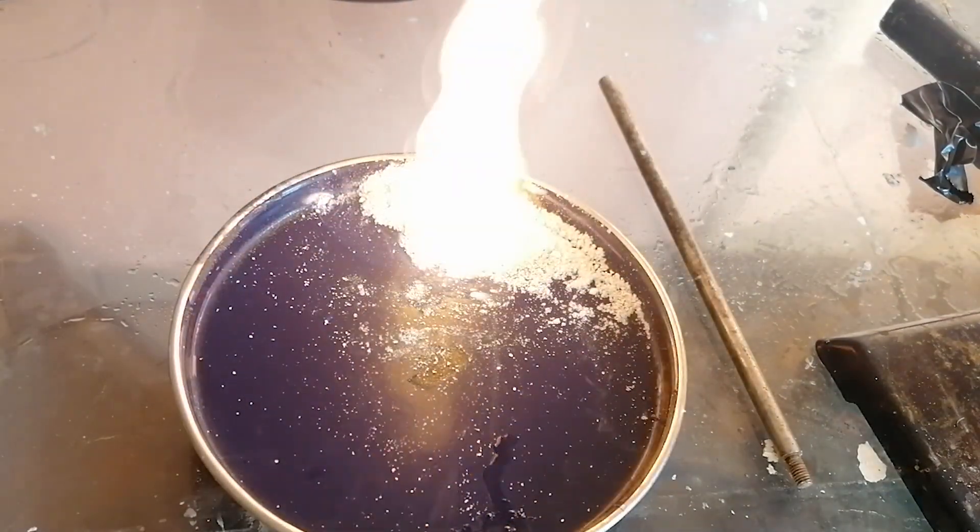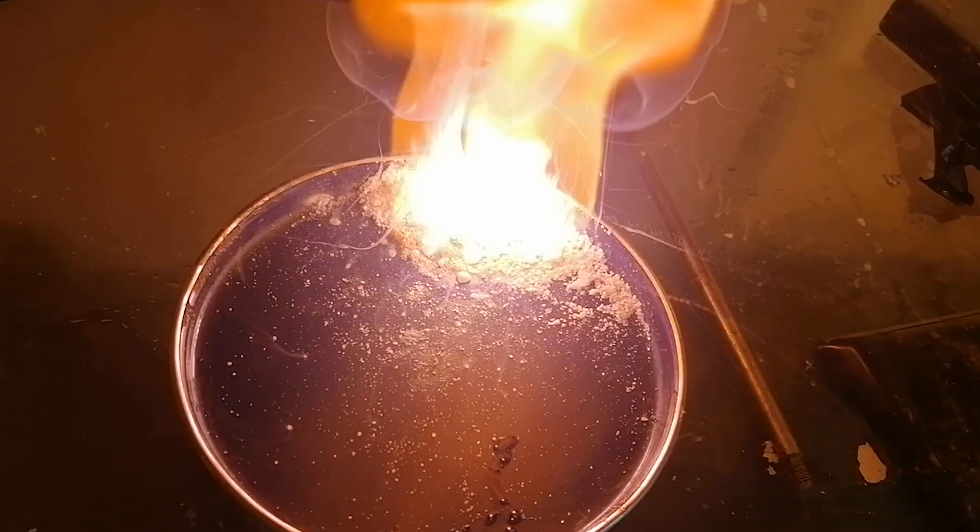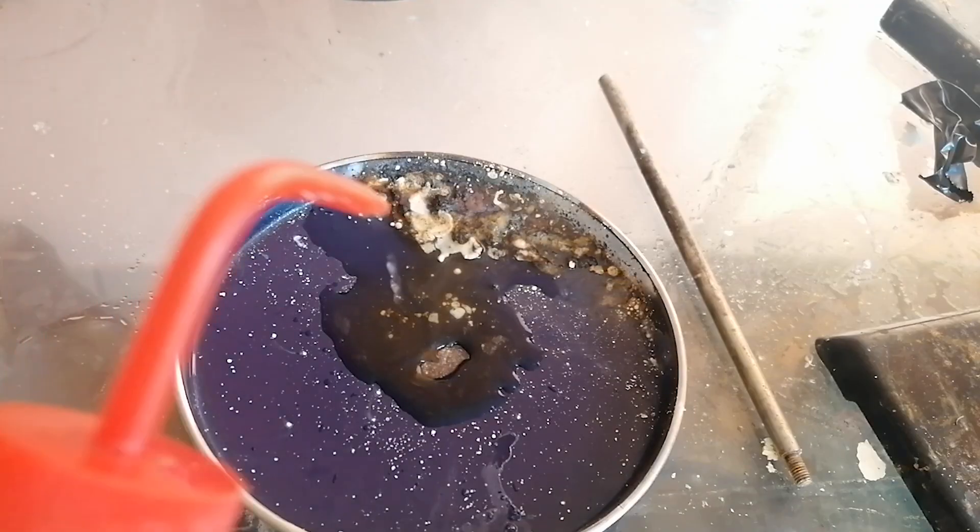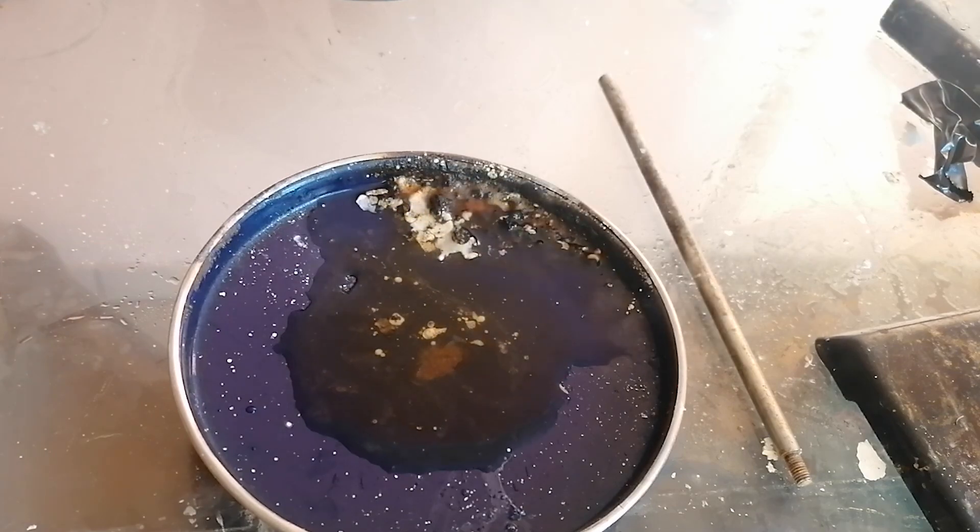You can see here why I really like using hexamine as a fuel. Not only does it burn really long, but with a proper oxidizer it can burn really fast too. Afterwards I've quenched everything with some water. This was a really cool demo, now what about making a rocket engine?